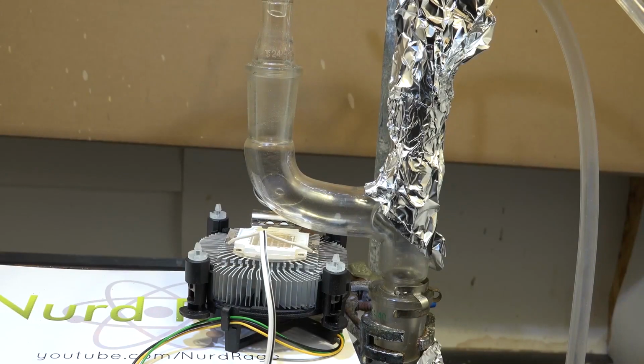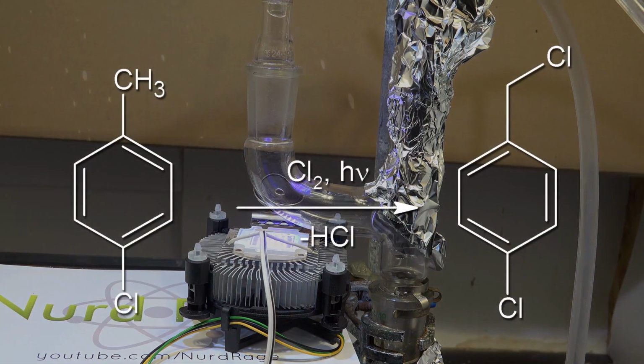Anyway, turn on the heating, the cooling water, and wait until the p-Chlorotoluene starts to reflux. Now turn on the UV light and start generating the chlorine, admitting it to the reaction. What's happening is the ultraviolet light is initiating free radical chlorination. The light breaks up the chlorine into chlorine radicals. These chlorine radicals attack the methyl group on the p-Chlorotoluene to form p-Chlorobenzyl chloride as well as hydrogen chloride.